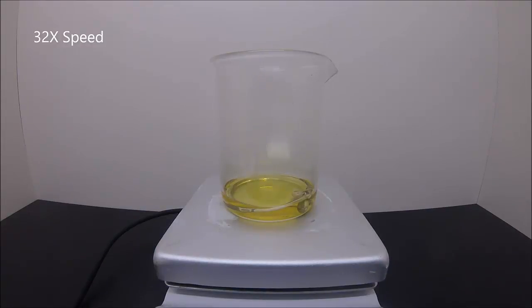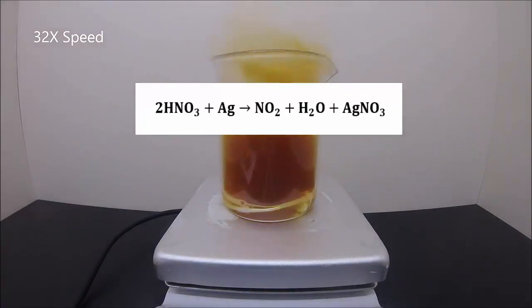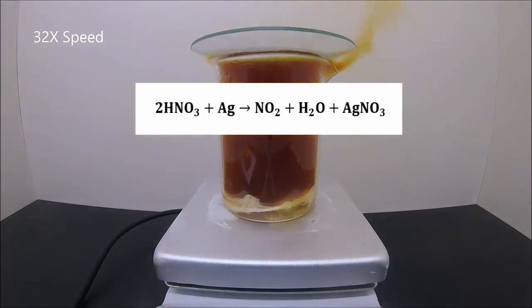The reaction will become very violent, it's right about now. What is happening here is the nitric acid reacts with silver and forms nitrogen dioxide, water, and silver nitrate.